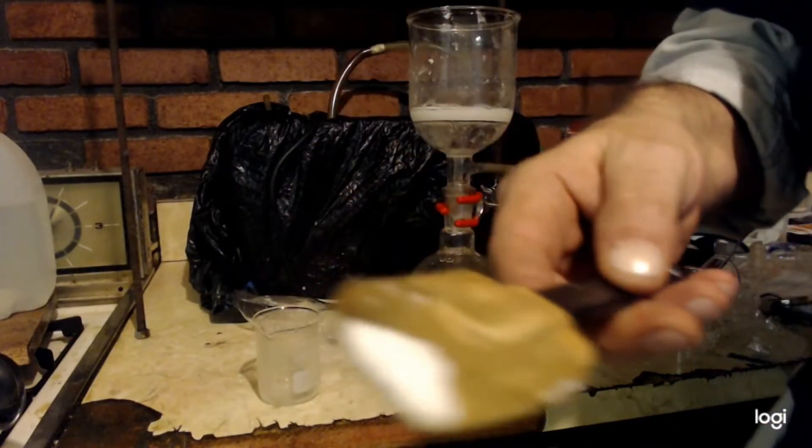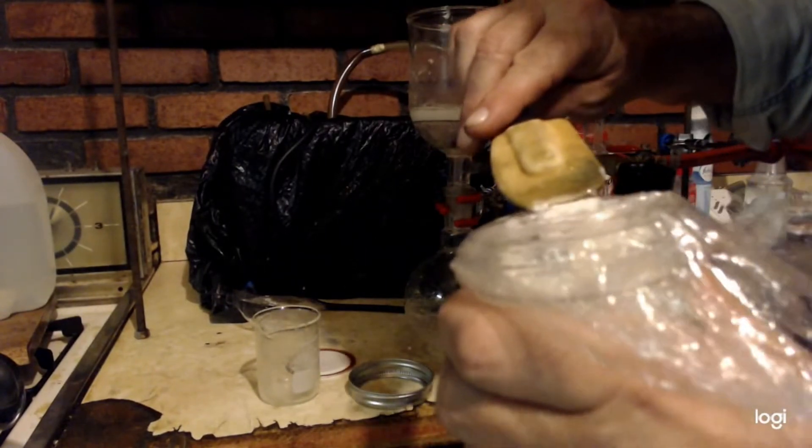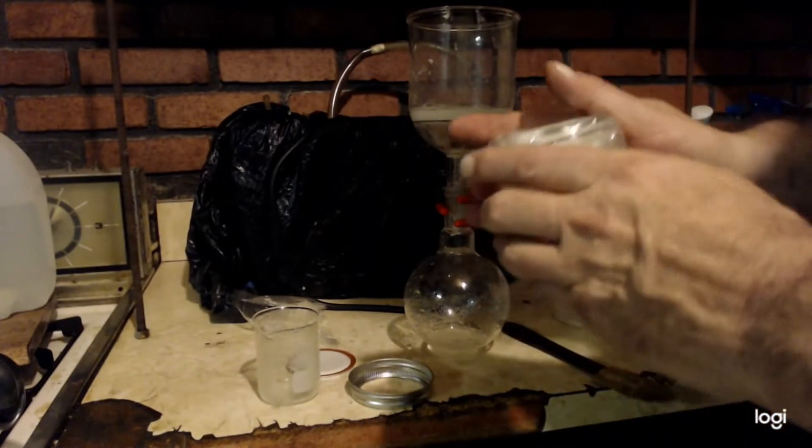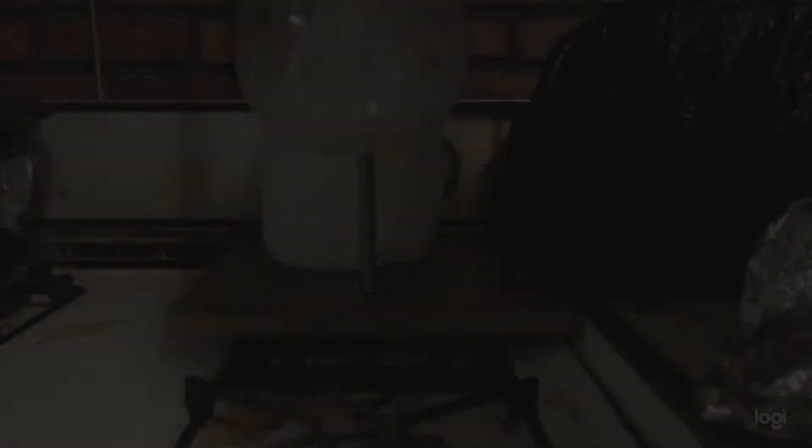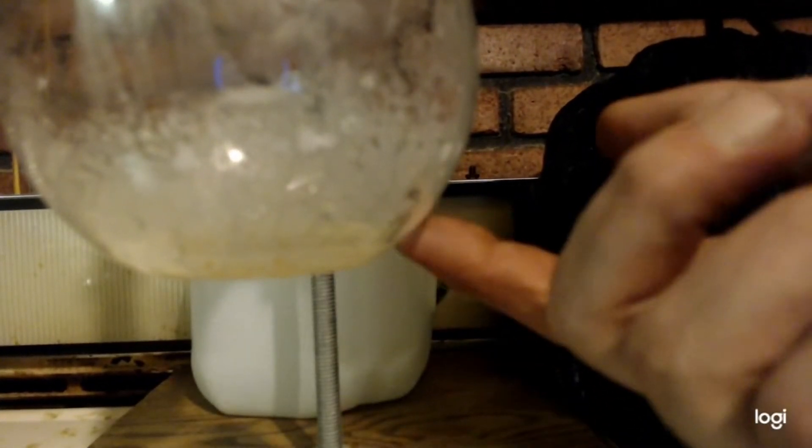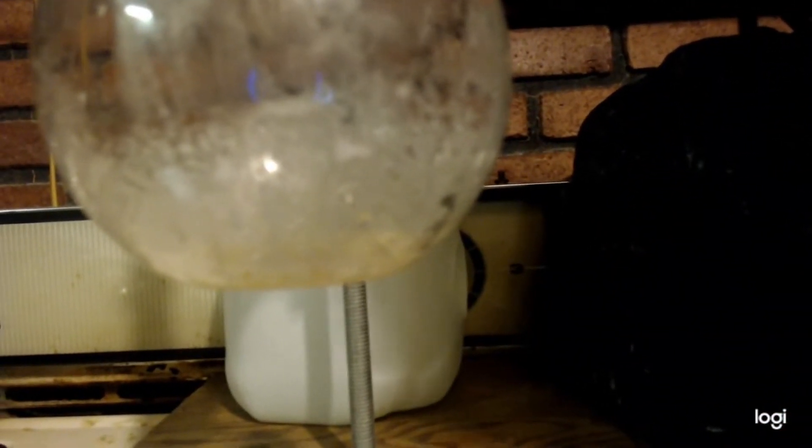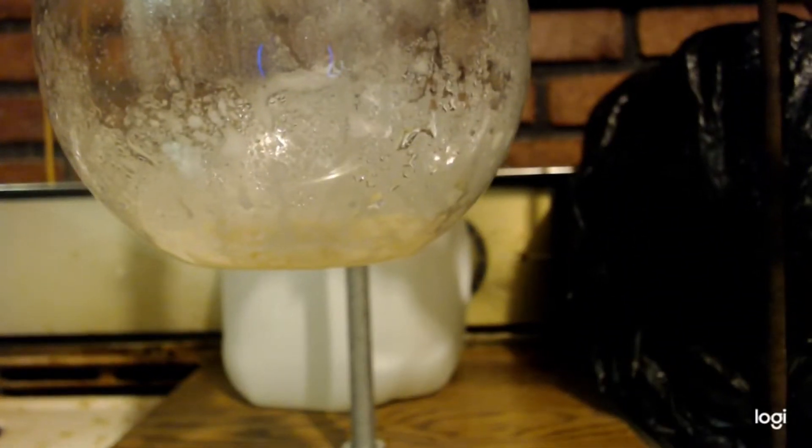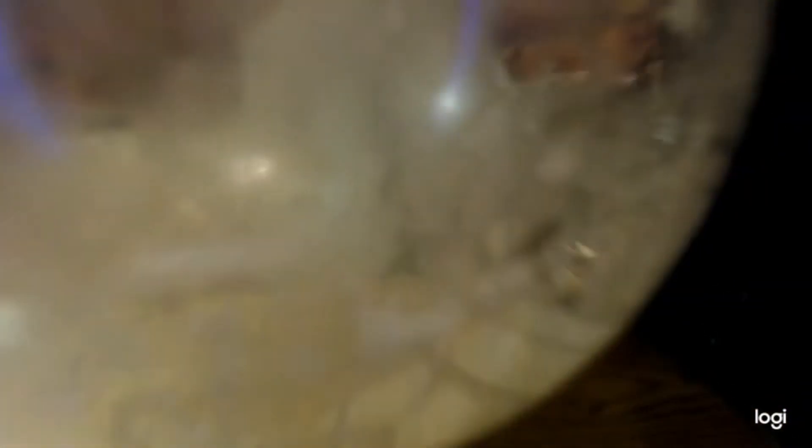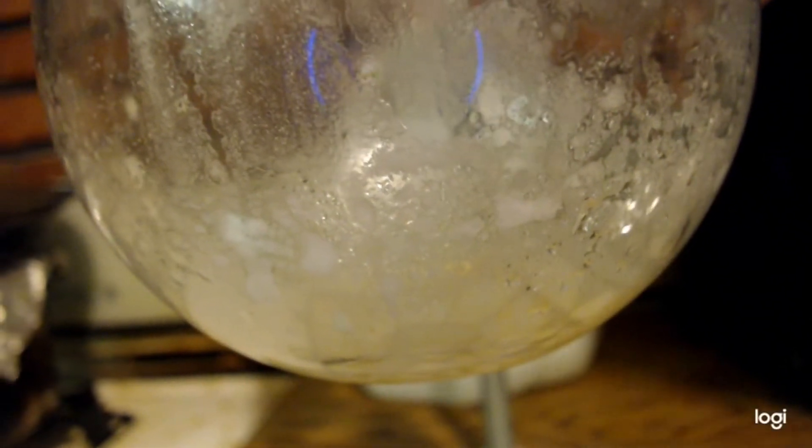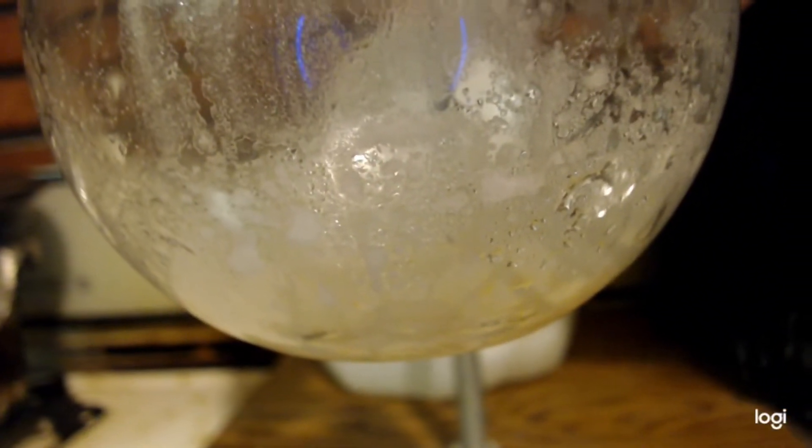Alright, so I finally got my vacuum pump out, got it working right. And I just got a couple mils of water. I put it on a strong vacuum. As you can see, it has pretty much got the last little bit out now. That's all I can do, that's the best I can do. Now we need to purify what we got.